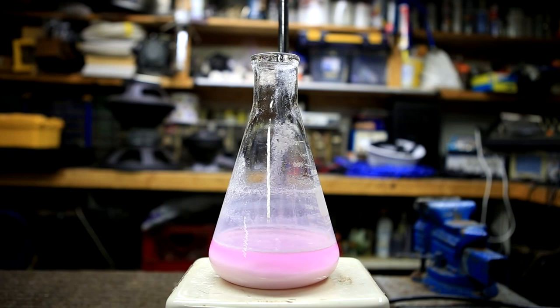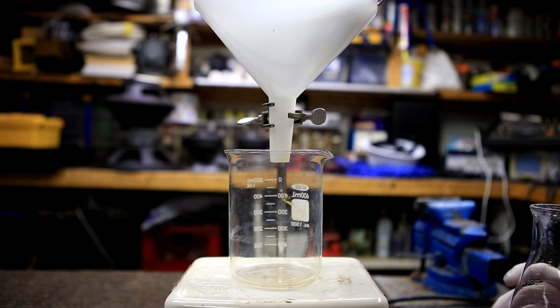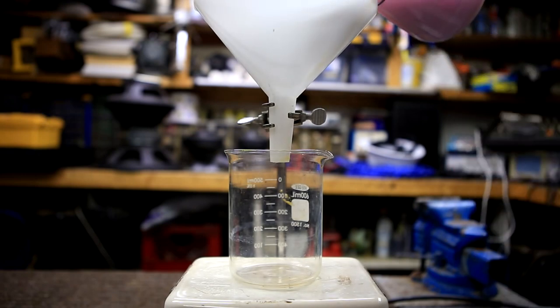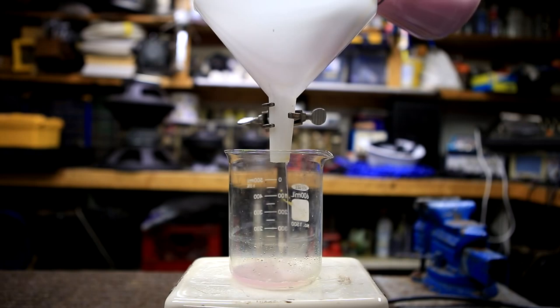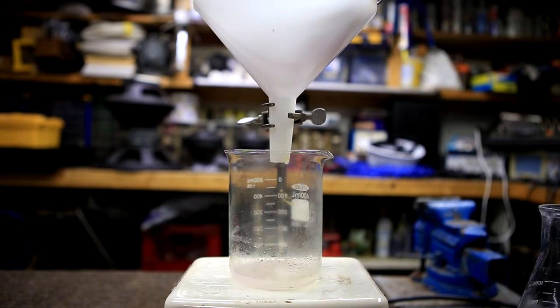After 5 hours the solution was allowed to stand and the suspension was allowed to settle on the bottom. The solution was gravity filtered using coffee filters which is unfortunately quite time consuming. In this case vacuum filtration is extremely useful because it'll take a lot less time.